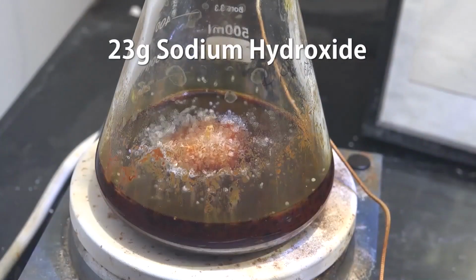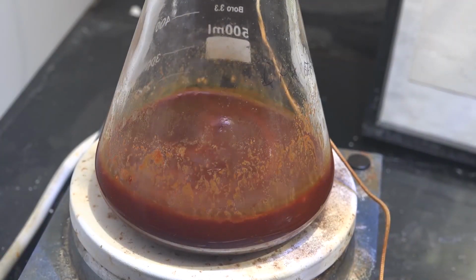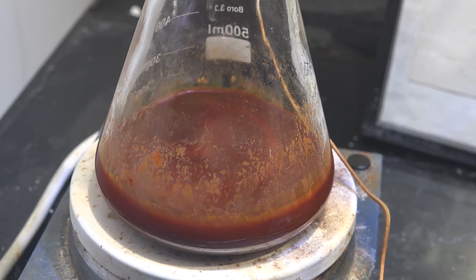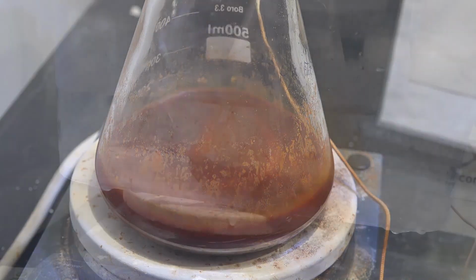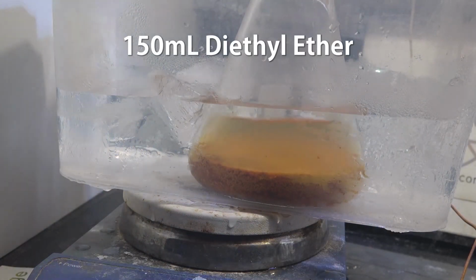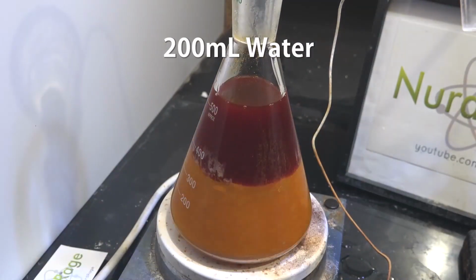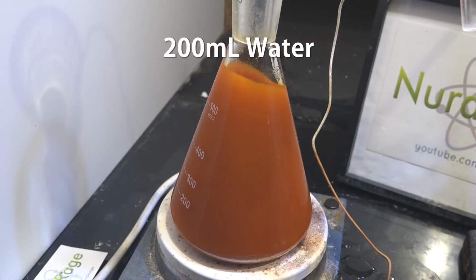Now we add in 23 grams of sodium hydroxide and stir. I want to make the water even more polar so it will absorb all the highly polar impurities, but reject the non-polar impurities. Now place the mixture on ice bath and let cool. Once it's cold, we add in 150 milliliters of diethyl ether that I extracted from starter fluid. Add in another 200 milliliters of water and let it stir for about half an hour.